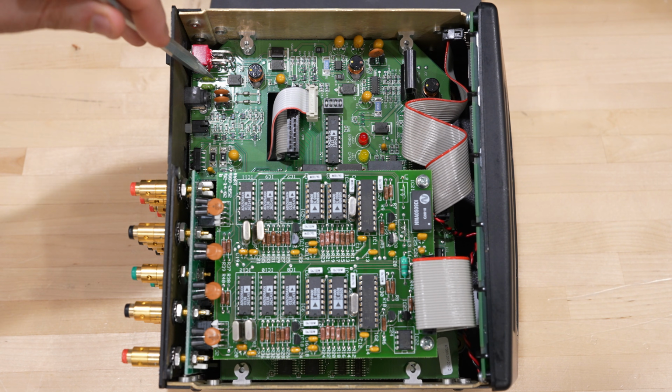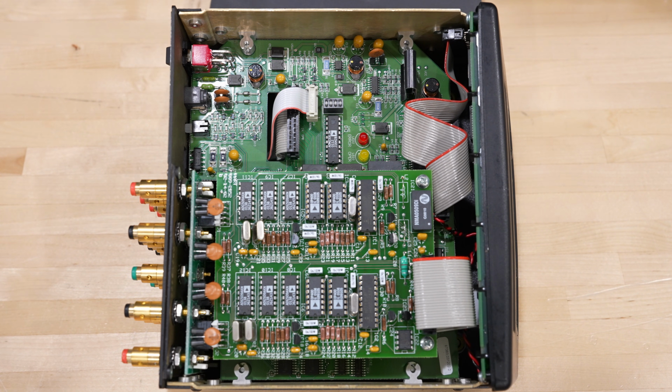And there are 2 fuses over here, and what do you know, the top fuse was dead. I already replaced the top fuse, and I thought, hey, that's a pretty boring repair. Maybe somebody just reverse biased it or so and just damaged the fuse. But then I noticed that even with the fuse replaced, when you connect it, it draws a lot of current, which explains why the fuse died originally. That must have been the original cause. So something else is wrong. Now this is a bit more interesting to investigate. So I thought we should take a look at it.